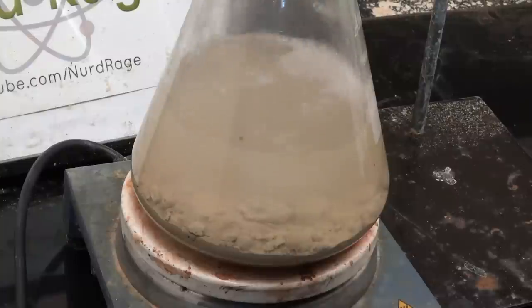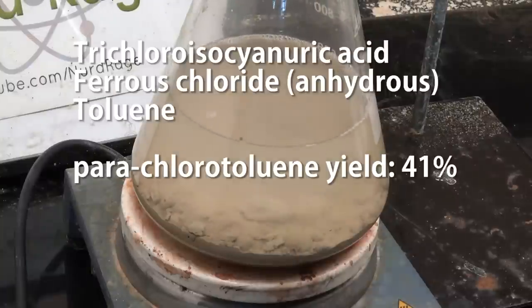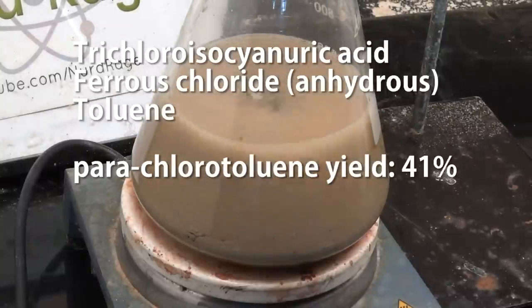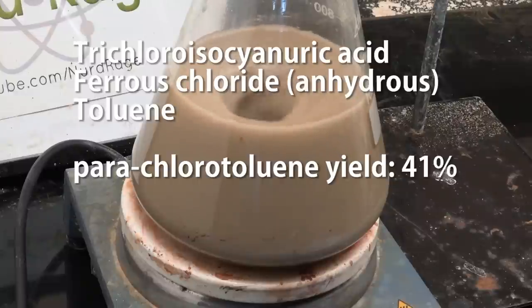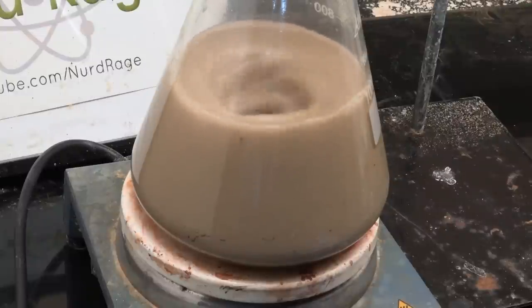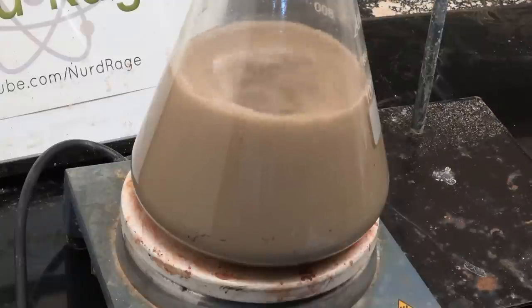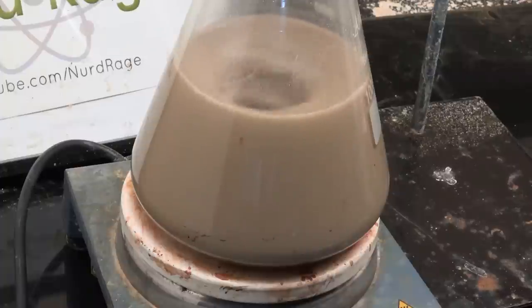The best method so far was the method of using ferrous chloride catalyst and directly adding the trichloroisocyanuric acid to the toluene mixture. This gave me a para-chlorotoluene percentage of 41%. After two months of work and a thousand dollars of wasted chemicals, broken glassware and NMR spectroscopy fees, I decided to stop here and just show the best and most straightforward methods in this video.